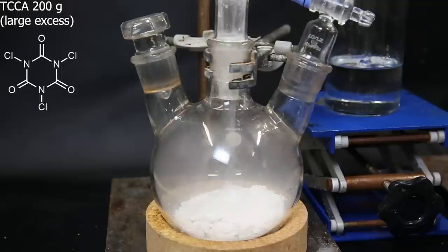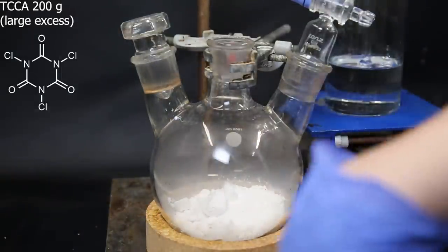Care must be taken, since the TCCA powder is very irritating to breathe in. And unavoidably, some will always escape through small tears from hitting it with a hammer. After the tablets have succumbed to the abuse, I put 200 grams of the TCCA into the flask I set up before.